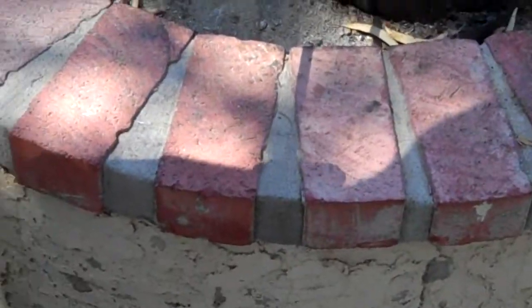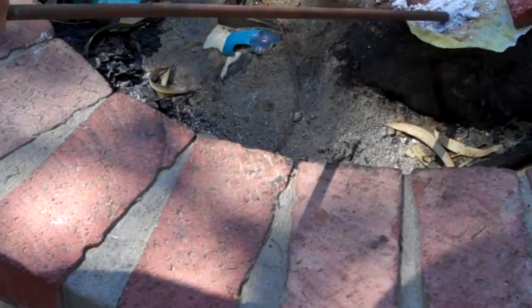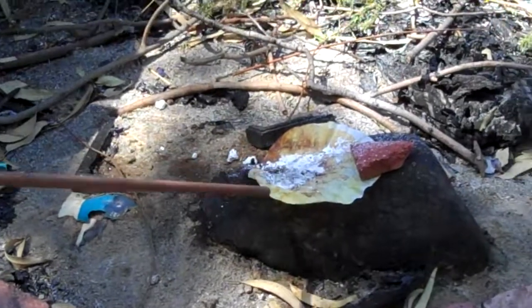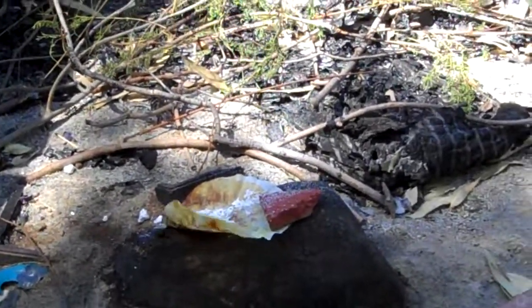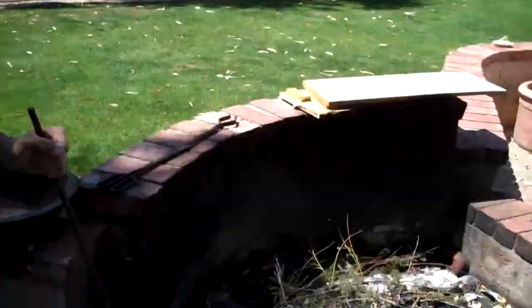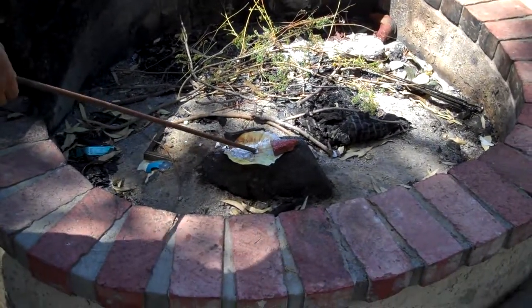Don't know what reaction occurs this way. This is just magnesium sulfate. It's had most of the water removed. I believe it's not the heptahydrate — the heptahydrate is the stuff you buy at the grocery store. I think it's the dihydrate. It's not anhydrous; there's still water in it. But five moles of water are now available to be absorbed per mole of this stuff.